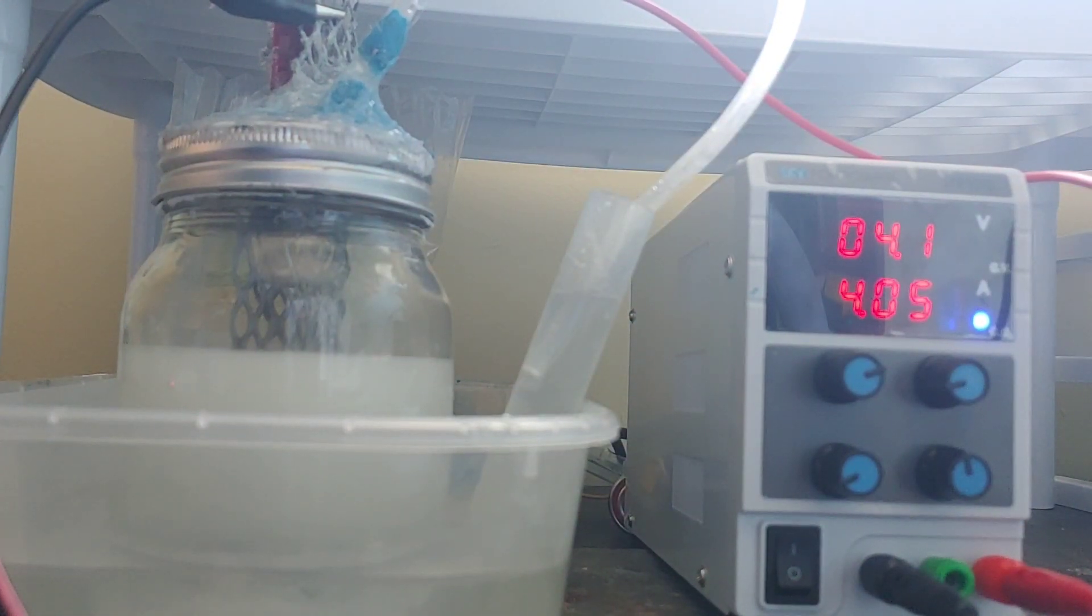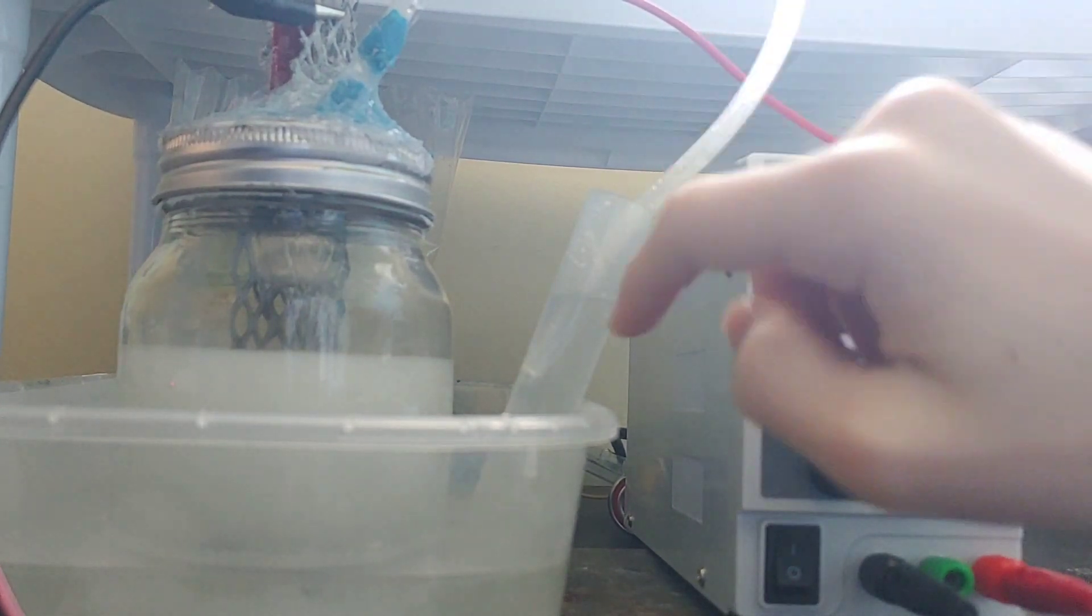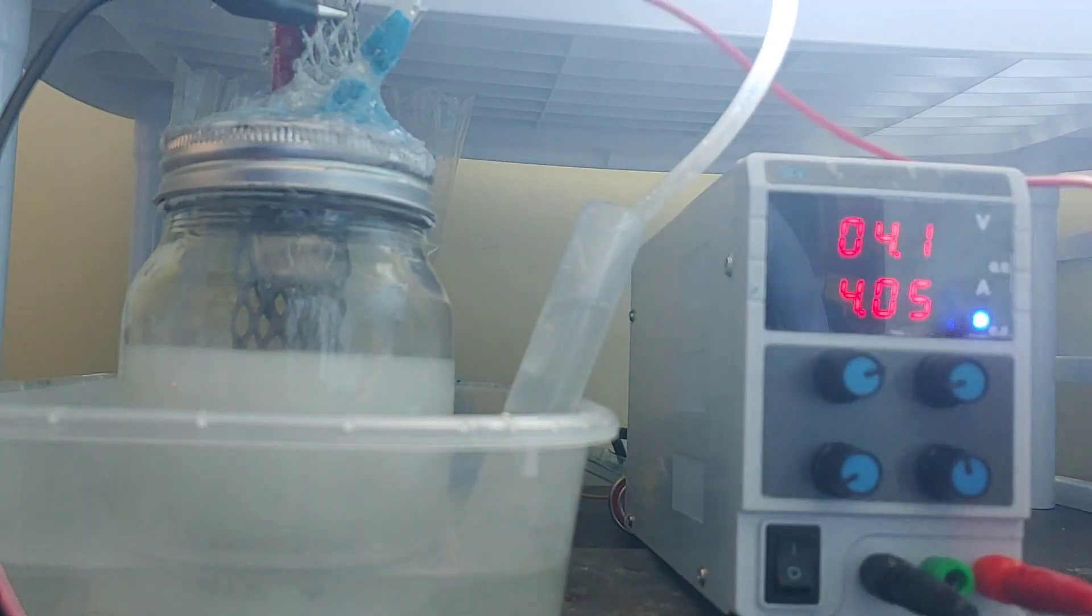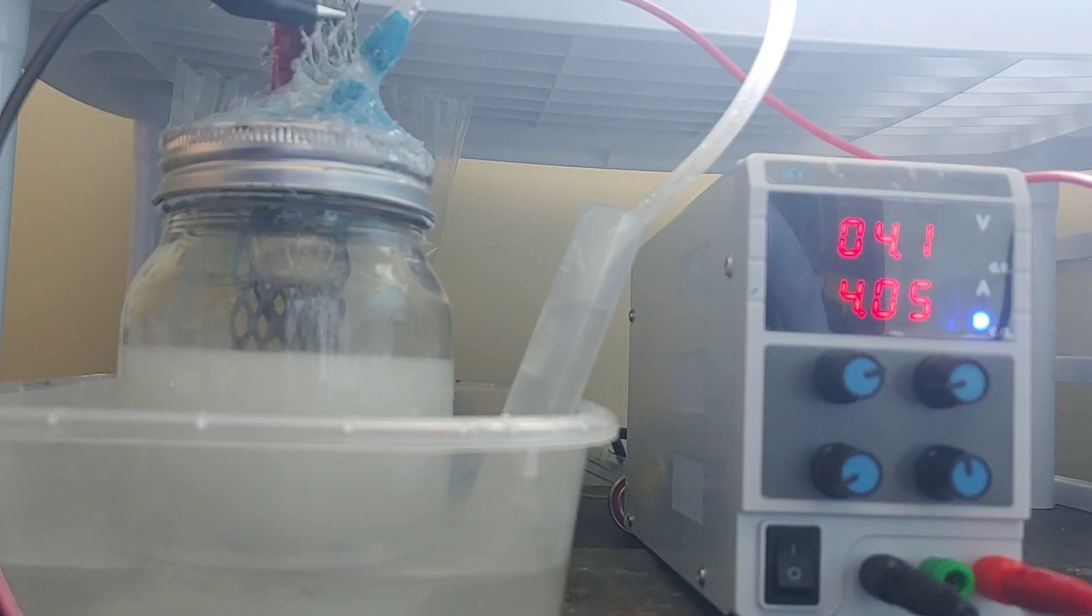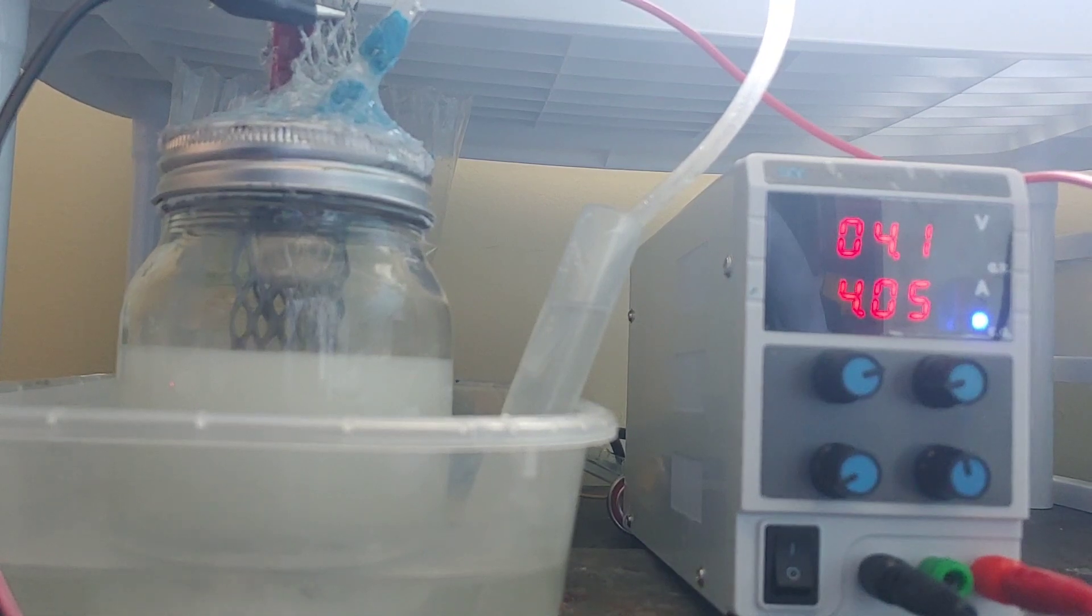It holds really well, so I can't complain about my setup. It's working really, really great, honestly. And as you can see I have a decent flow over here. And this is sodium hydroxide solution, by the way, just to neutralize the chlorine gas, because I don't want to gas myself out, no thank you.